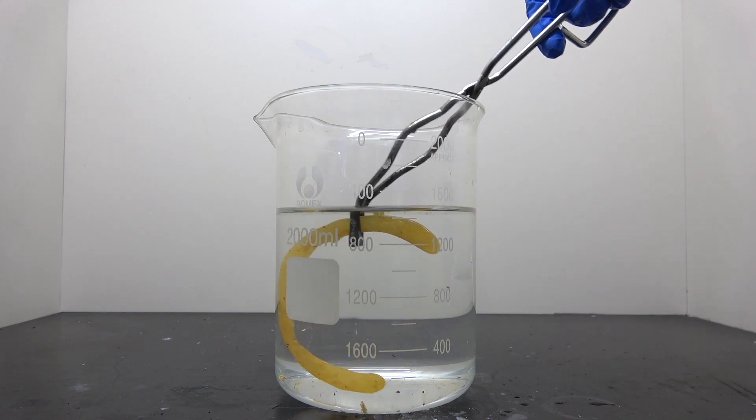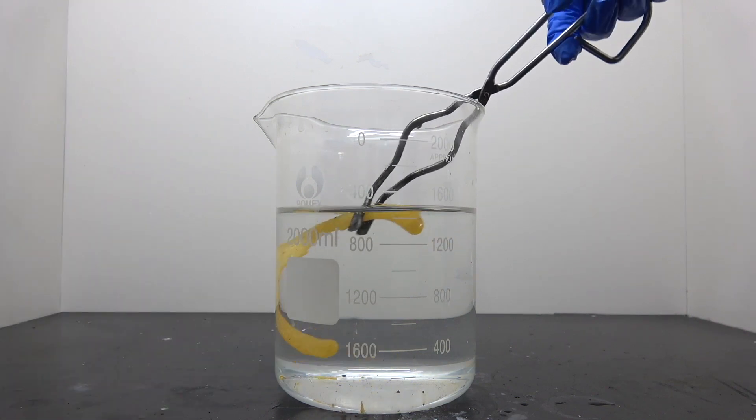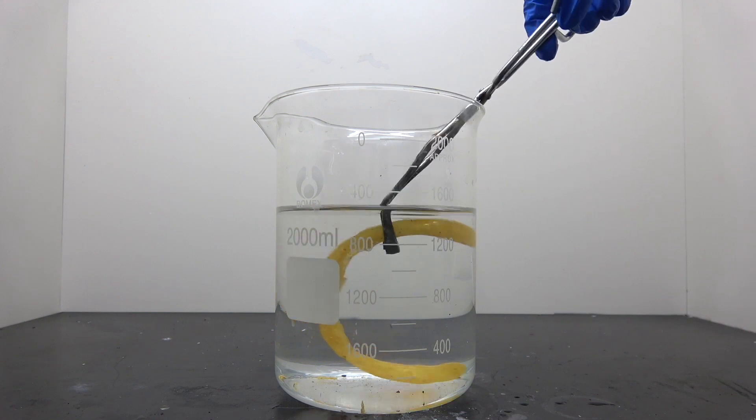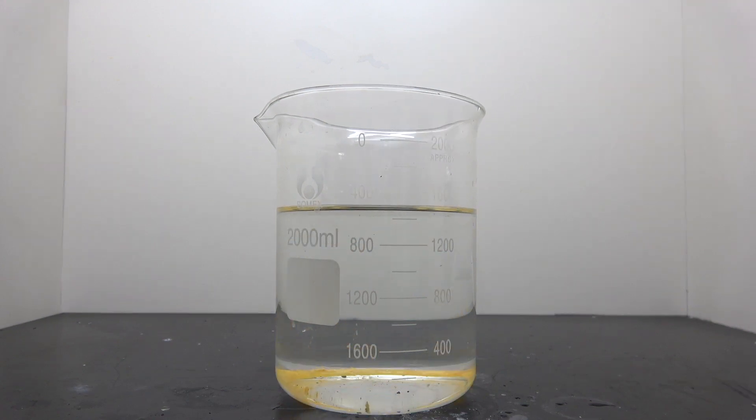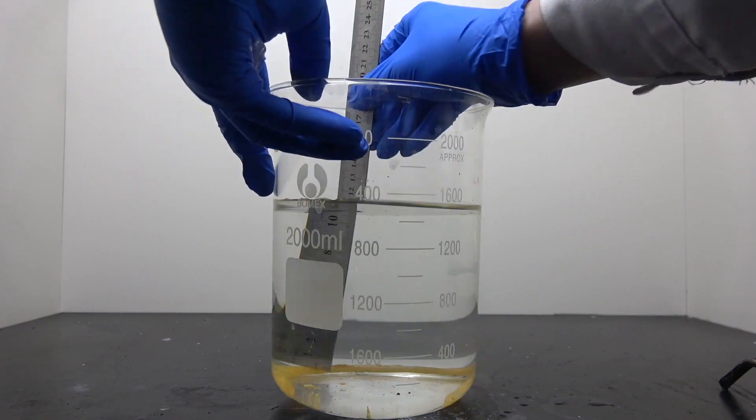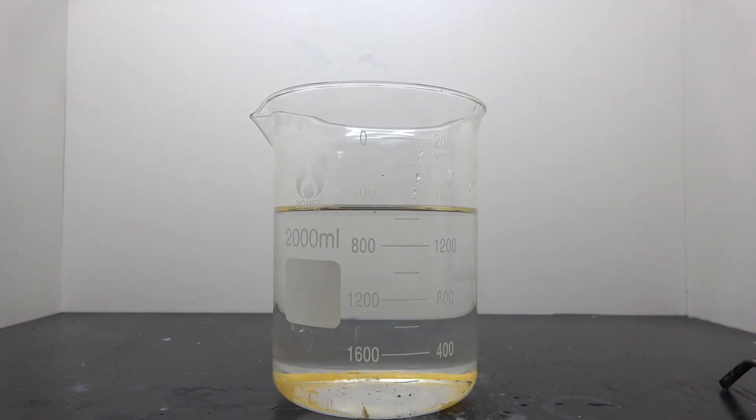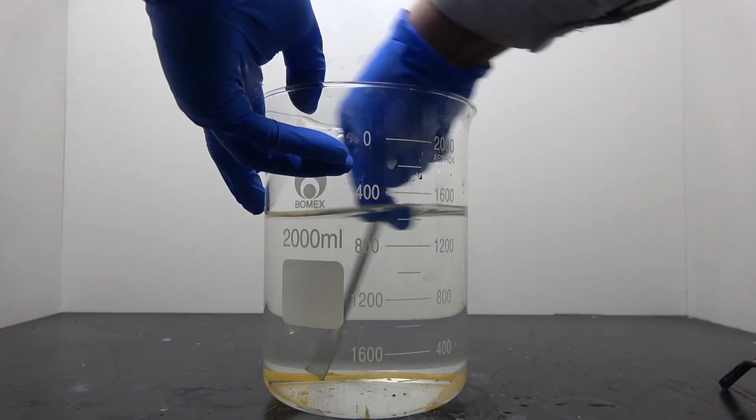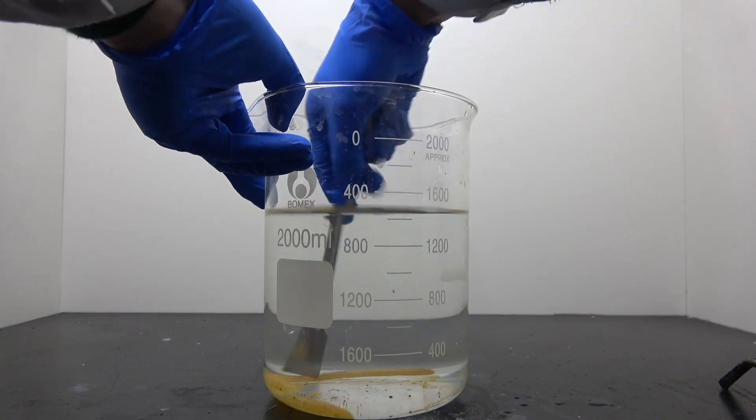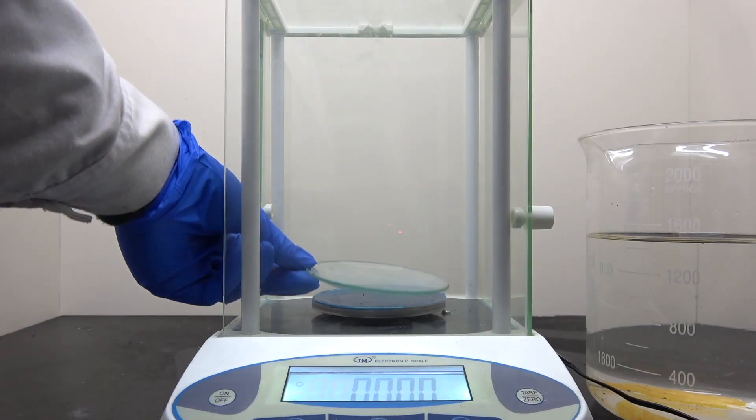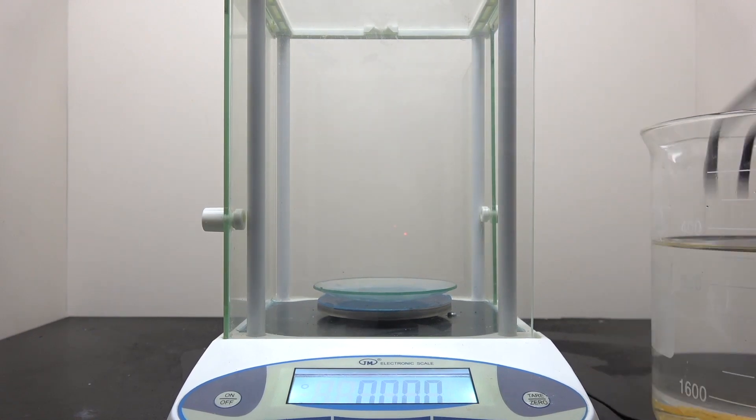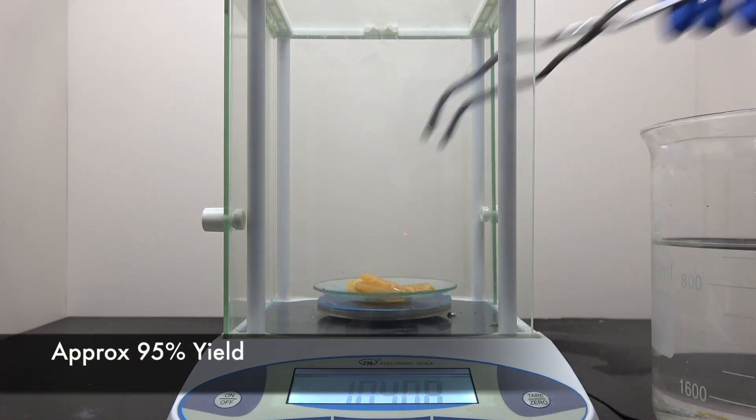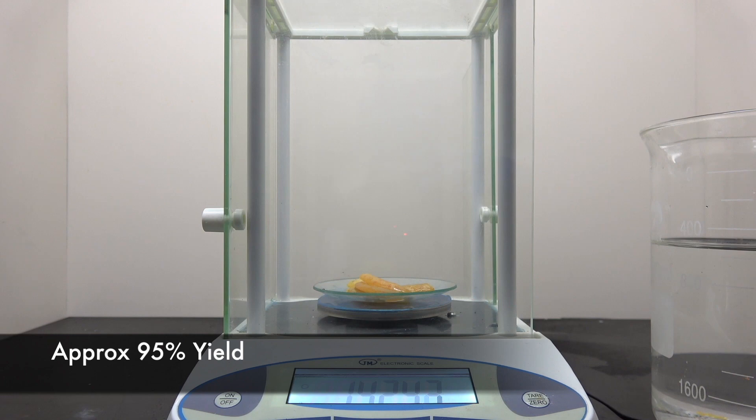Unfortunately, it didn't quite fit into the bottle that I intended to store it in. So I had to break it up with a spatula. What I found interesting was, despite its waxy-looking appearance, it was actually pretty crispy. And honestly, I was shocked to see how good the result was. It produced over 14.2 grams of product, which represents an astonishing 95% yield.